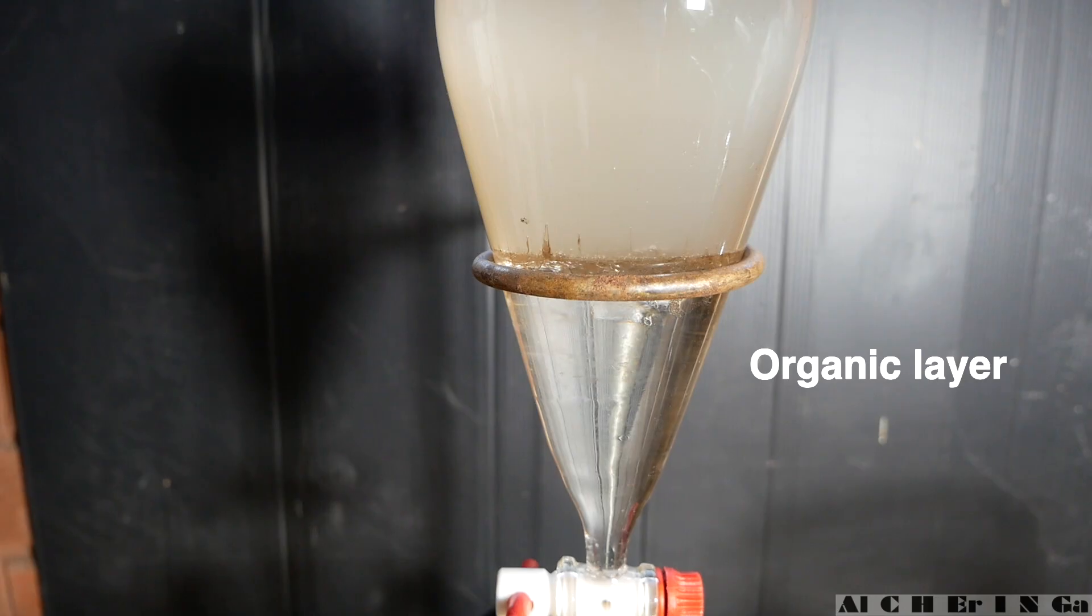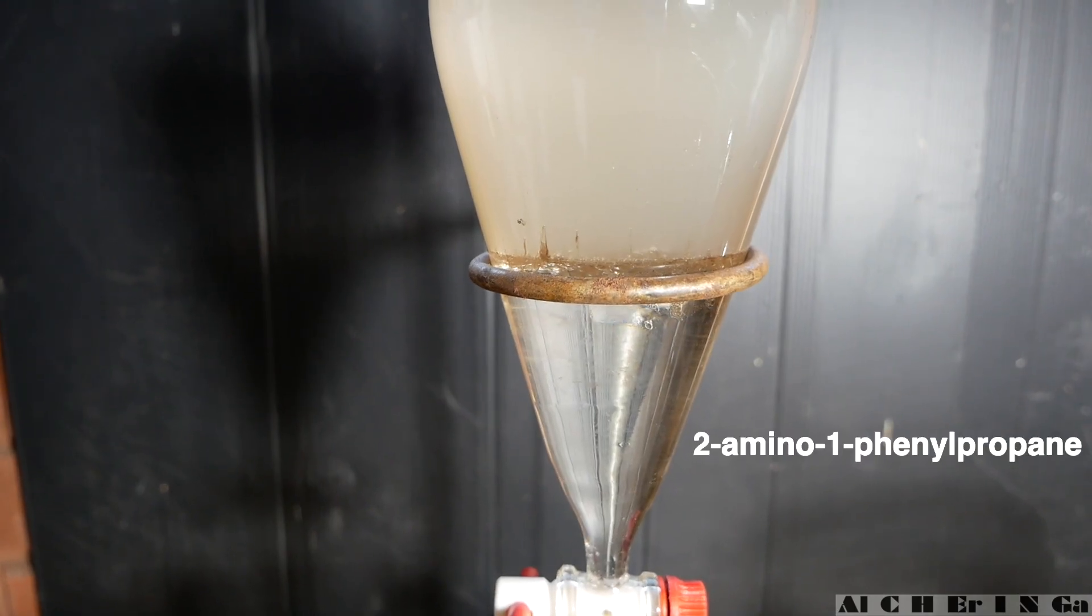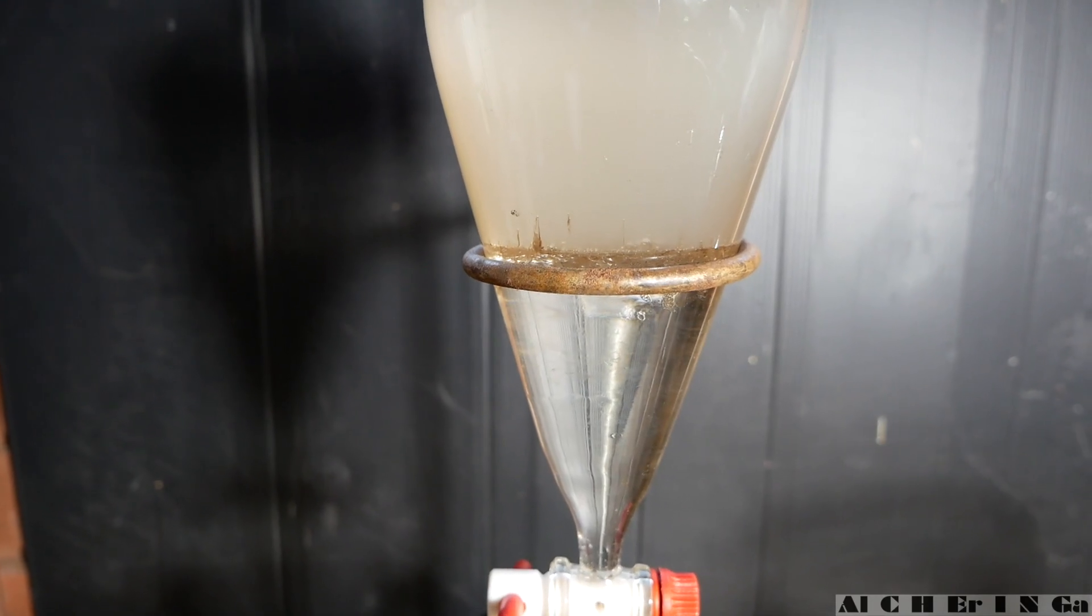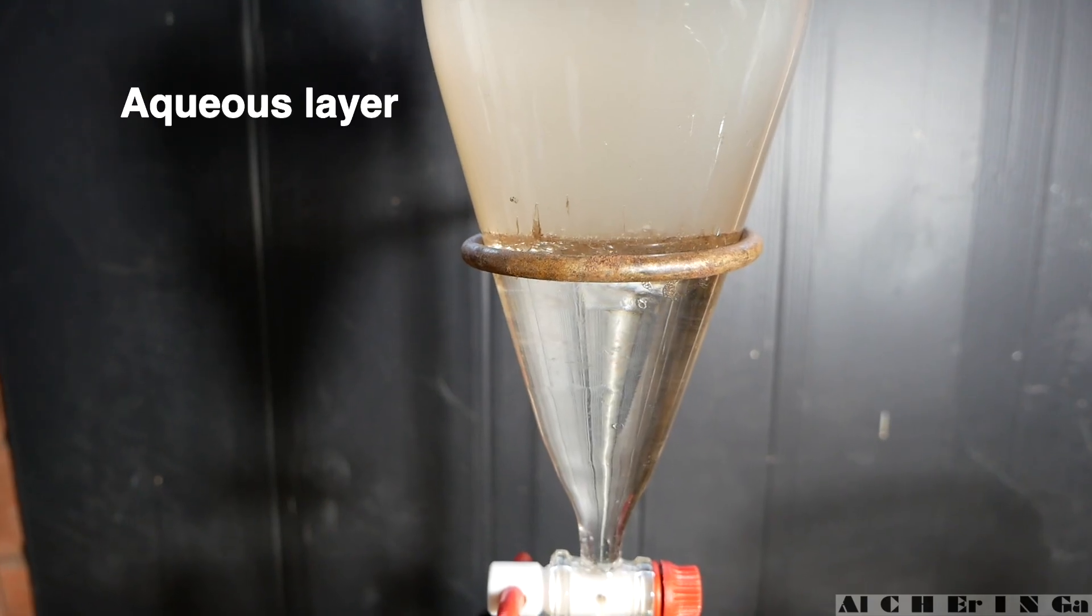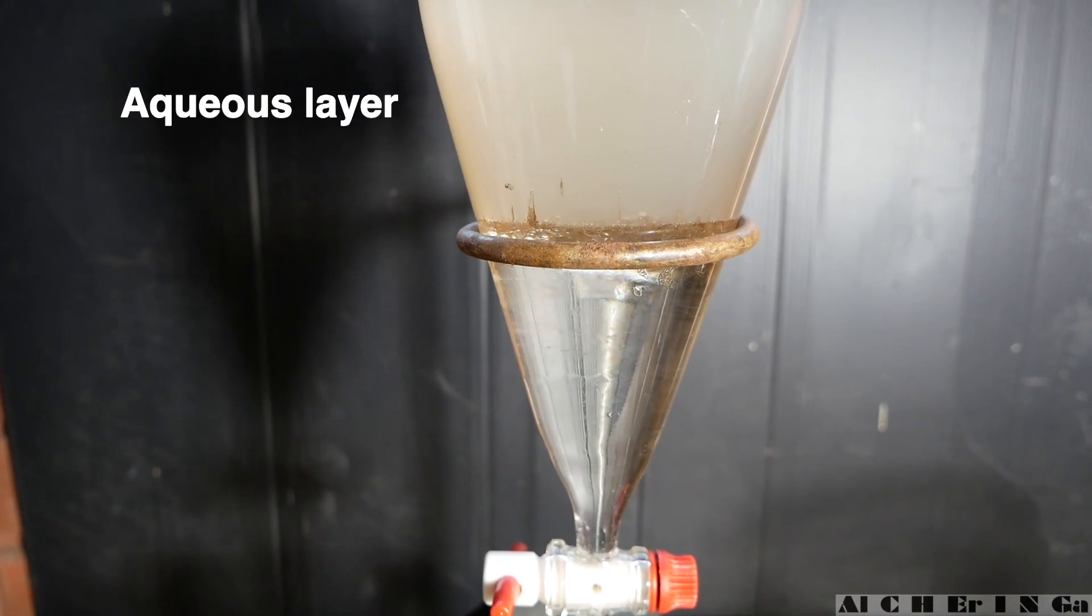The bottom layer is the organic layer which contains our product, 2-amino-1-phenyl-propane in the free base form. The upper layer is the aqueous layer that contains salts and other unwanted by-products that we don't want.